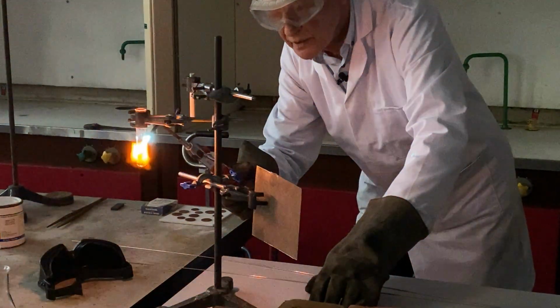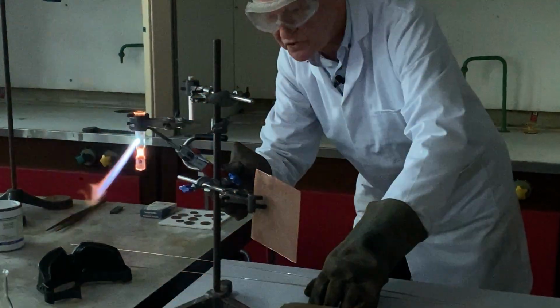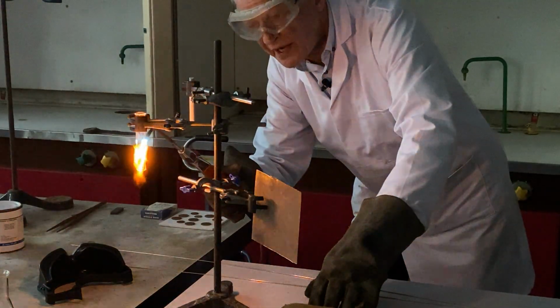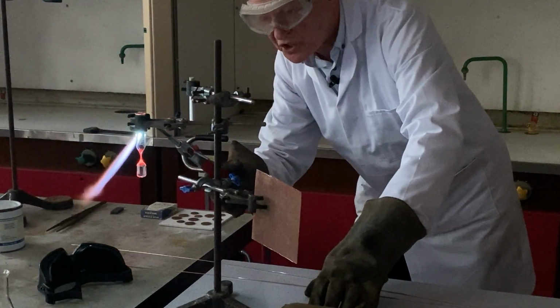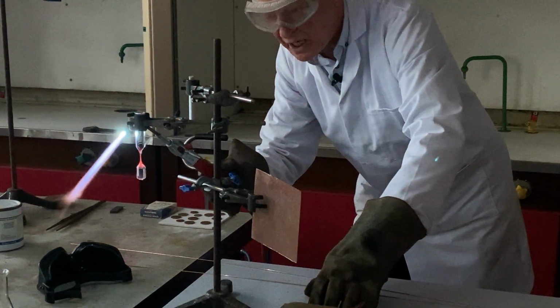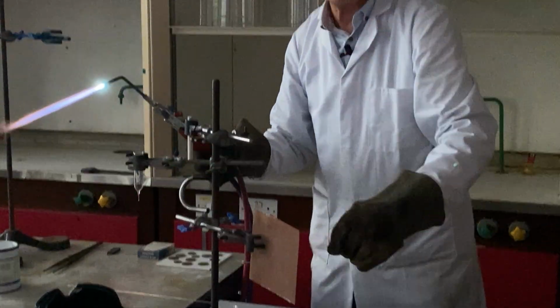And I have to be patient, not to overdo it, because otherwise it'll just fall to the floor, which I'm trying to avoid. I'm trying to get it to fall by about 15 centimeters, 30 centimeters. There we are. There it is. You can see we have plastic flow now. This is plastic flow, just a tiny bit, but I think you all see. Oh, dearie me. Did you see that?